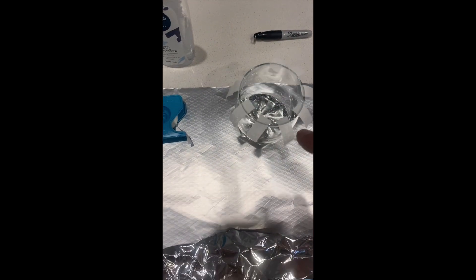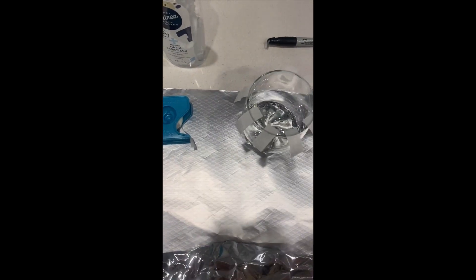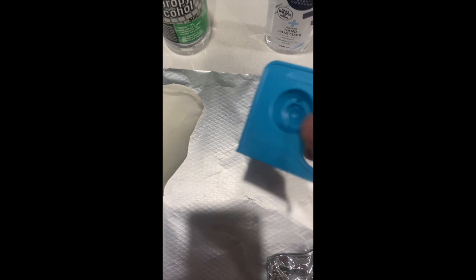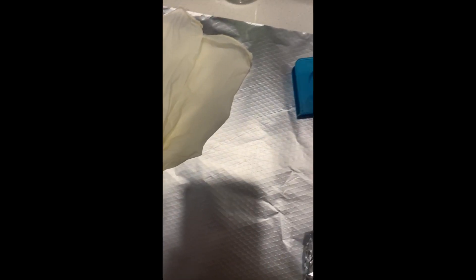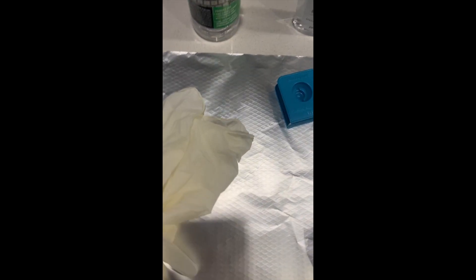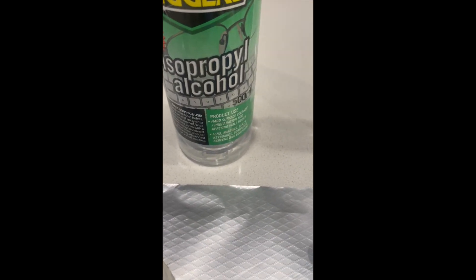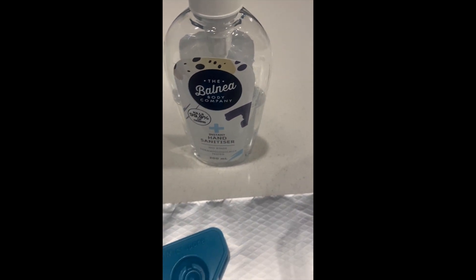We have some micropore tape. I've already cut pieces because it's impossible to do when you're wearing gloves. This is just surgical tape. You can use any breathable tape instead. We have some gloves as usual, our isopropyl alcohol, and our hand sanitizer. We've also got a marker for later.